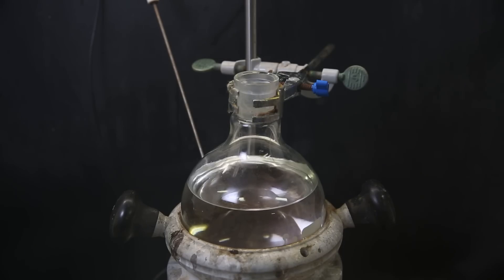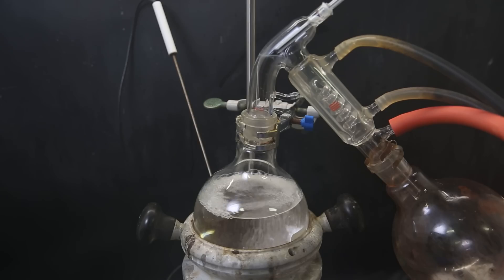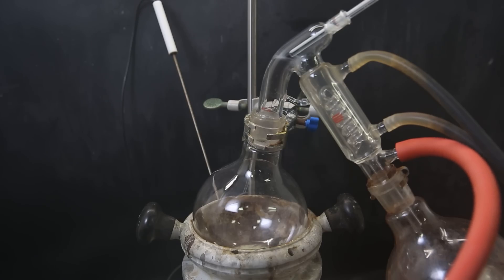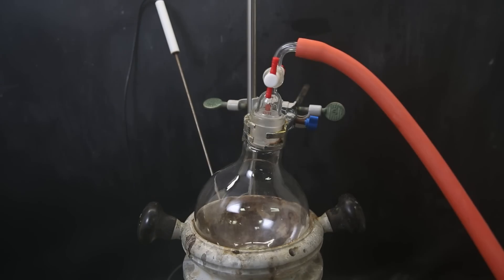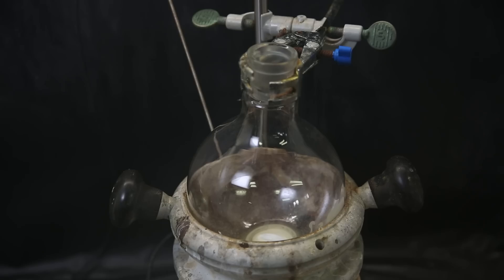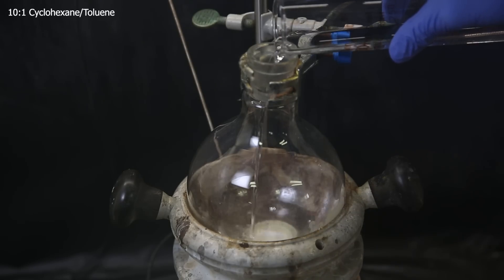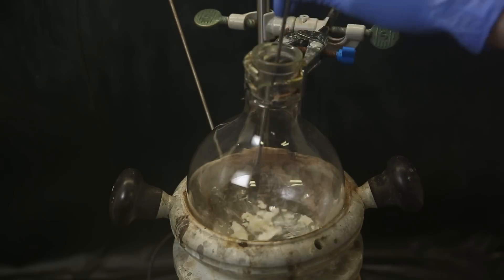When it's done, I collected one big fraction that I set up for vacuum distillation to remove all the solvent. Afterward, some liquid is left behind and I make sure all the solvent is gone by pulling a vacuum directly. It then quickly starts to solidify as it cools, and I add some cyclohexane toluene mix to purify it more, and I also break up the formed solid.